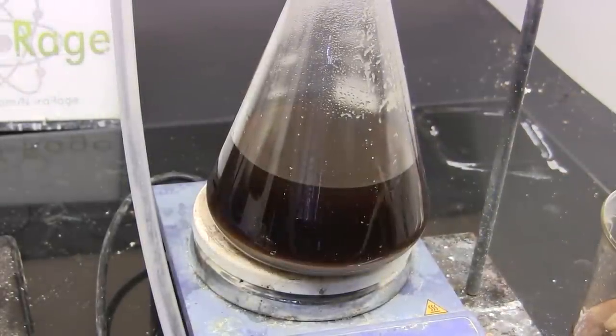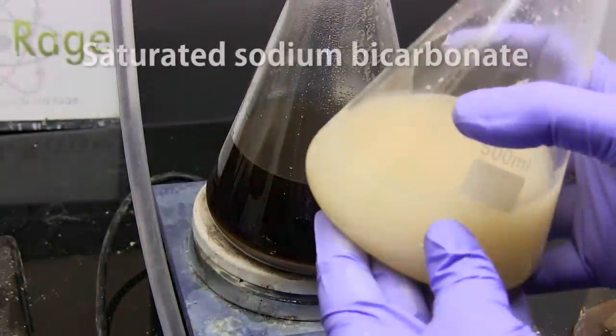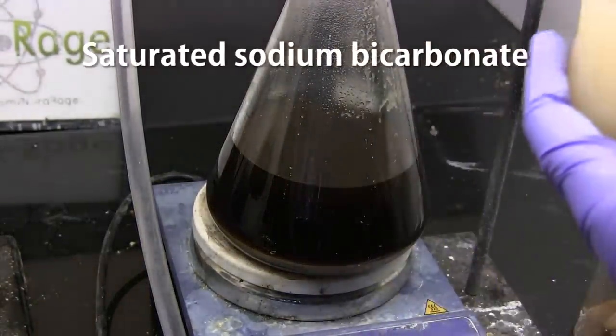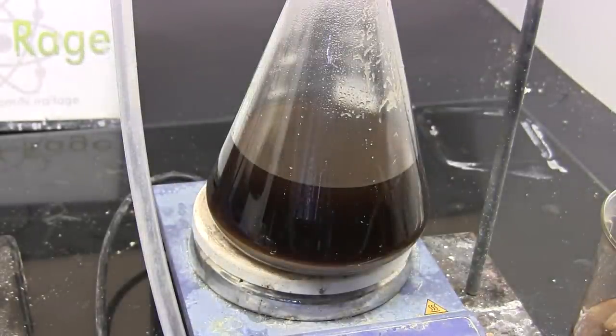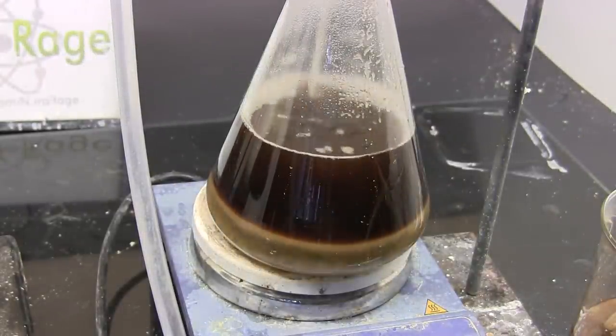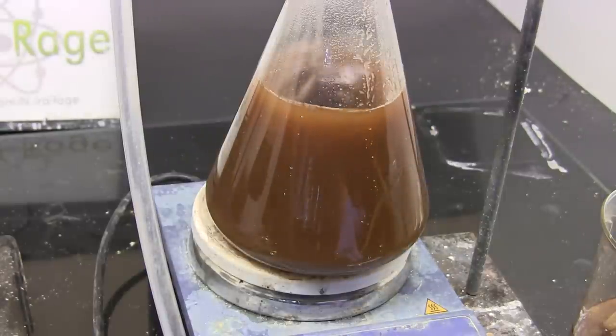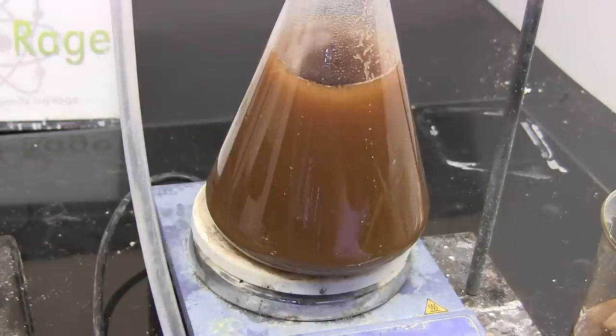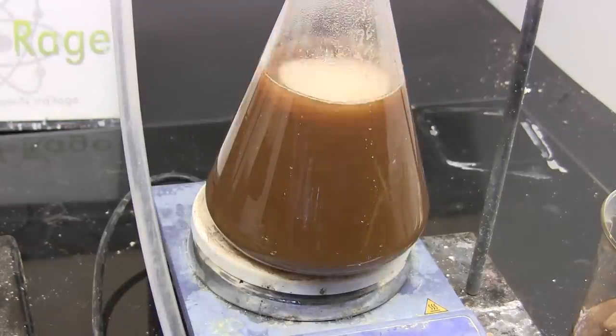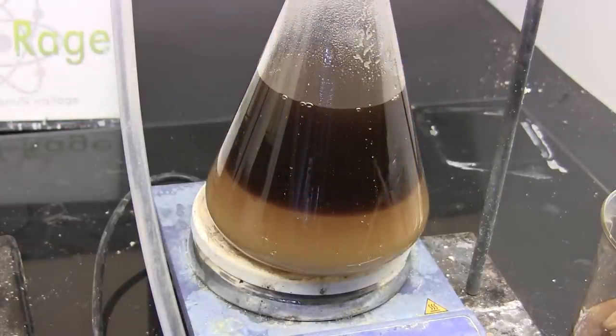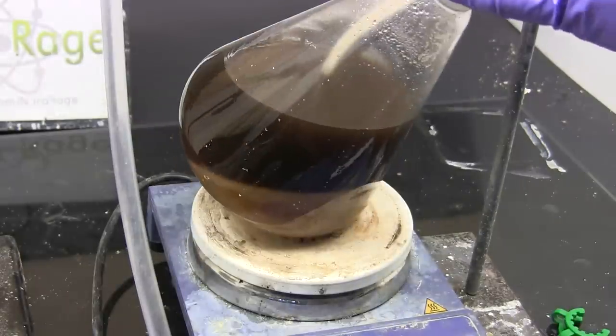Here we are after most of the aqueous layer has been removed. At this point we now add a saturated solution of sodium bicarbonate, also known as baking soda. The amount you should add should bring the total solution volume to one liter again. What we're doing here is using the alkaline sodium bicarbonate to neutralize any remaining hydrogen chloride. The hydrogen chloride must be removed to make the subsequent distillation easier. Now once again we remove the aqueous layer by siphoning.